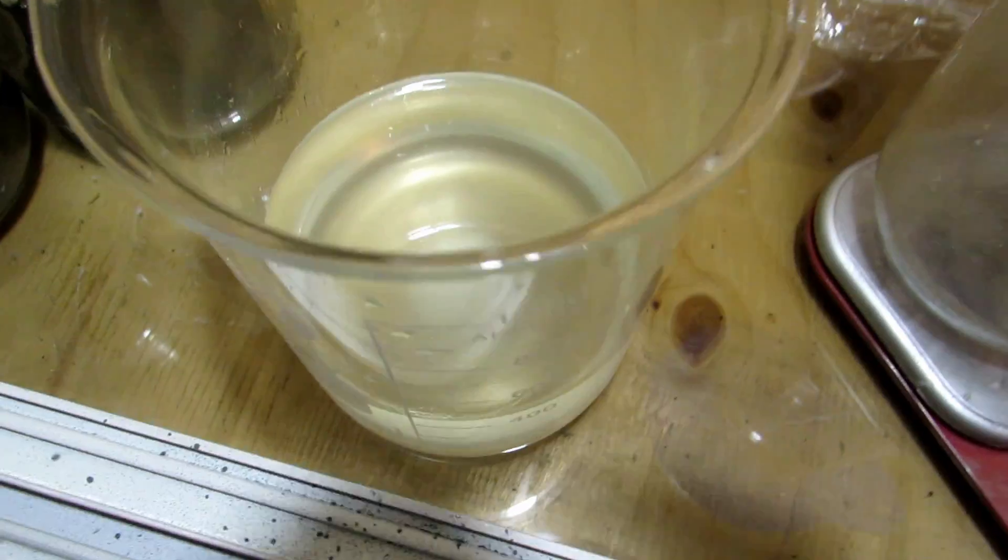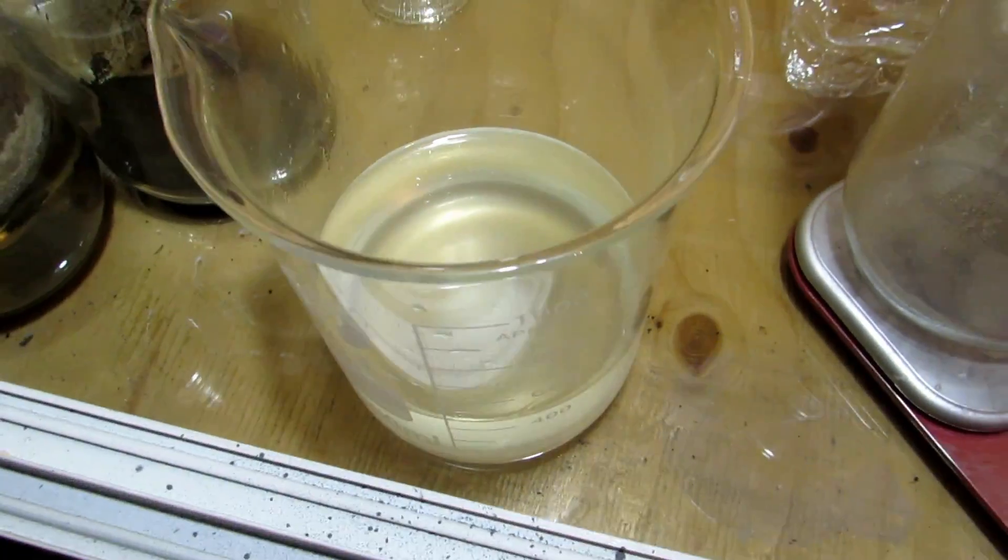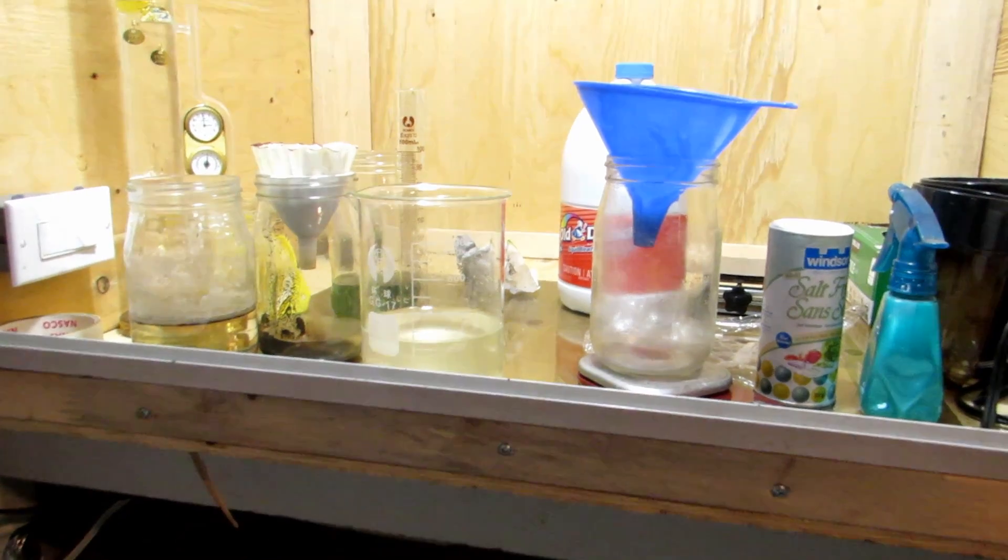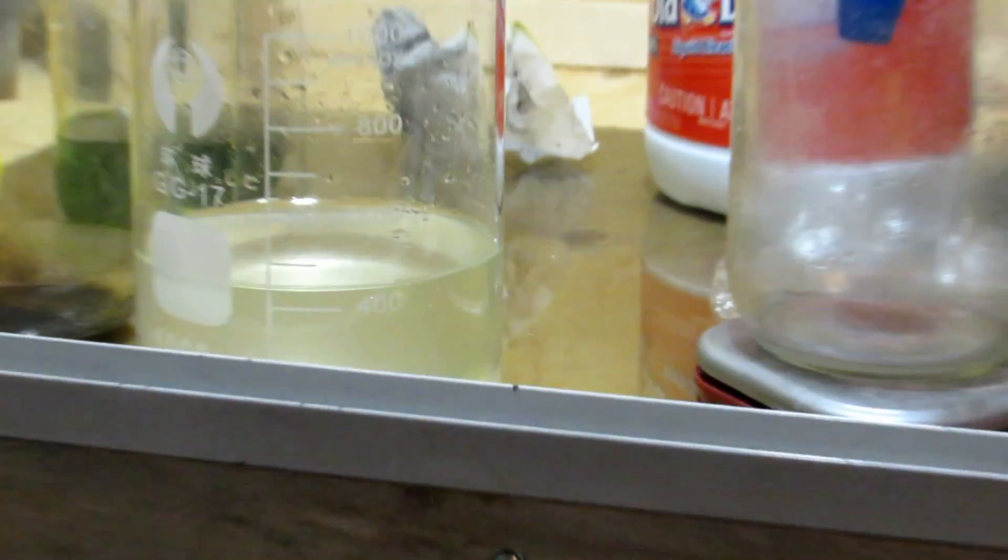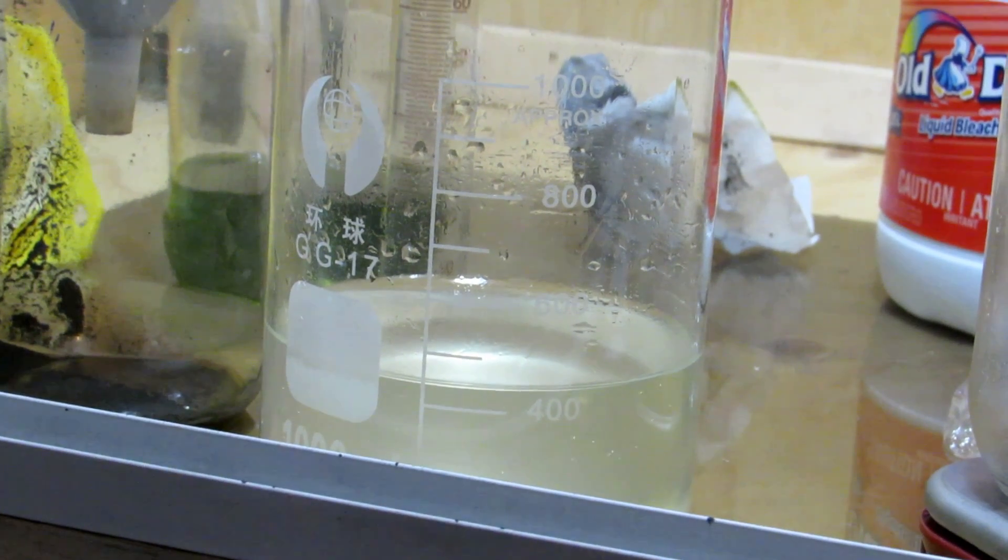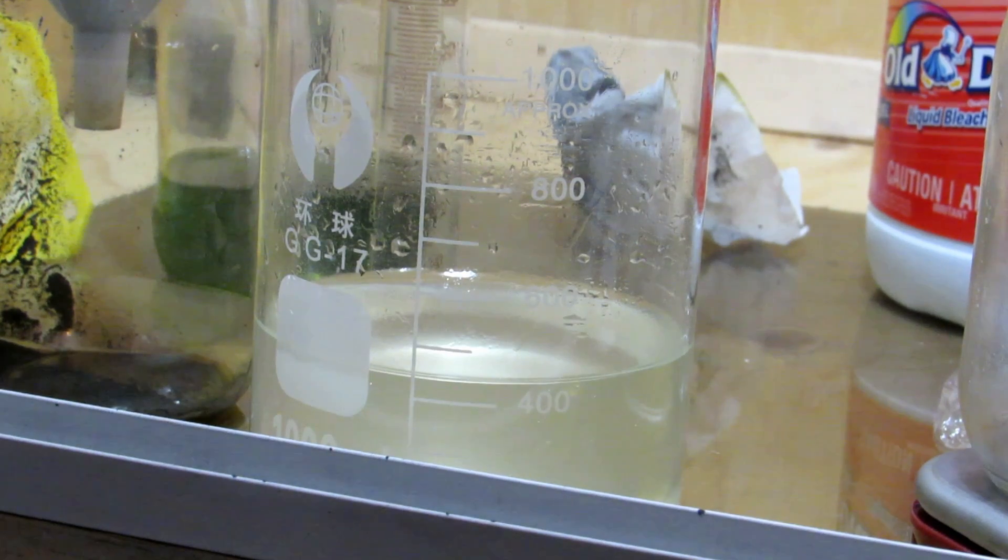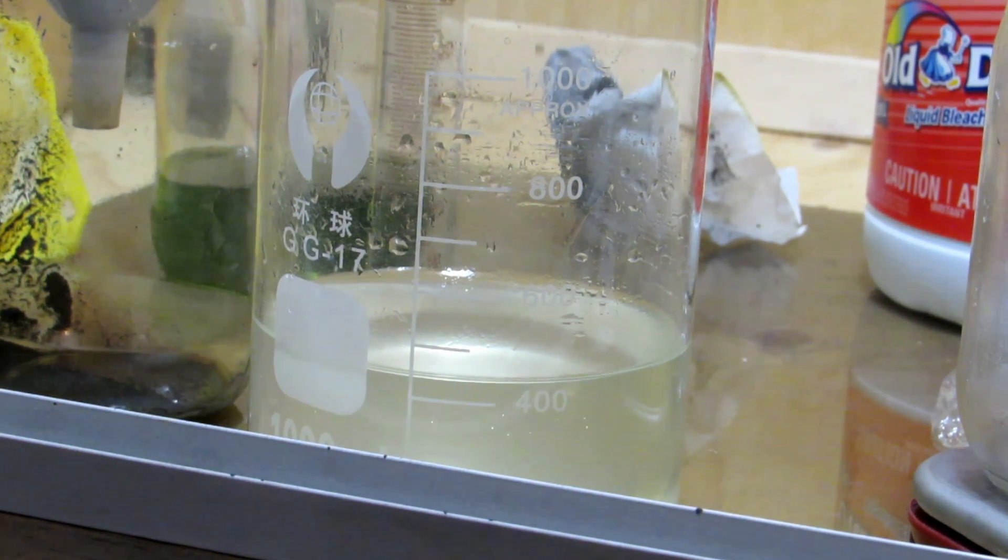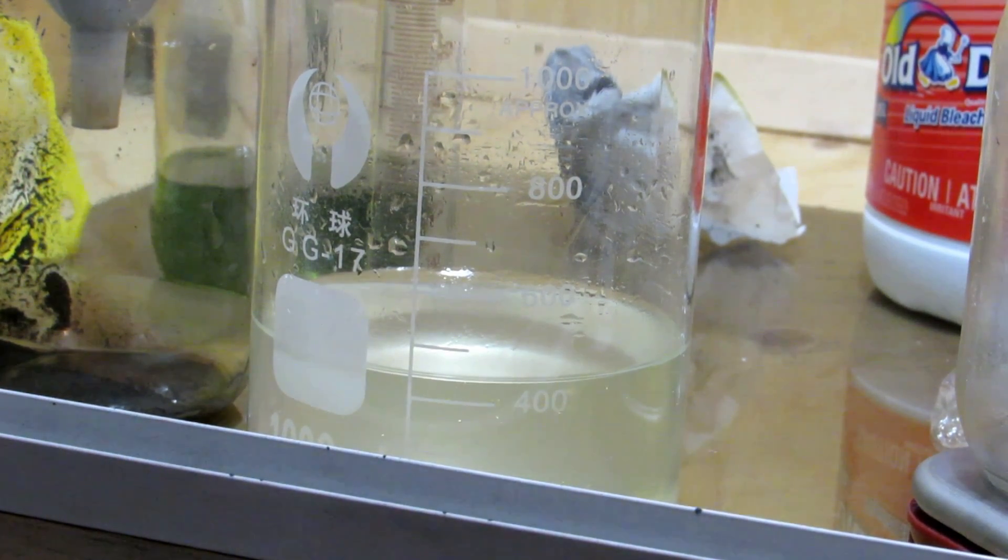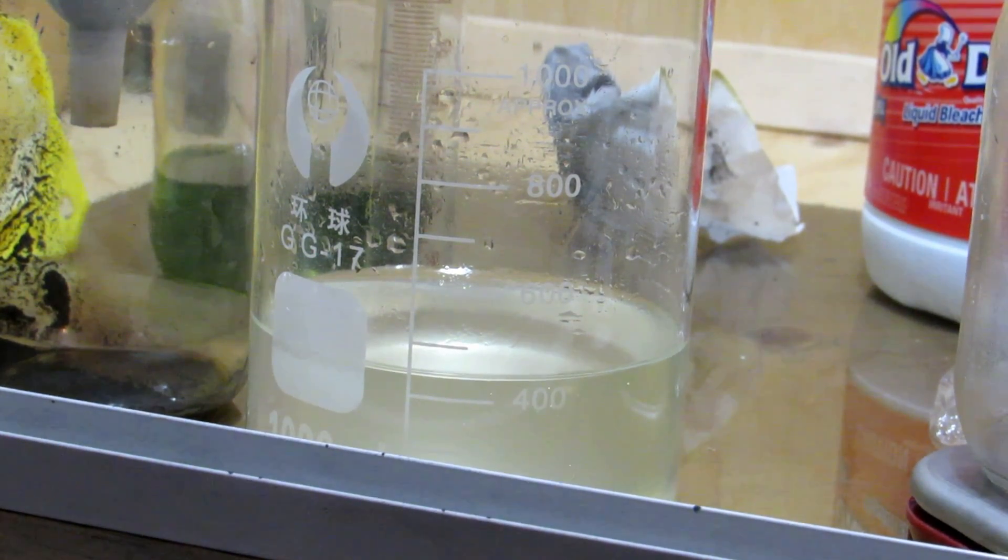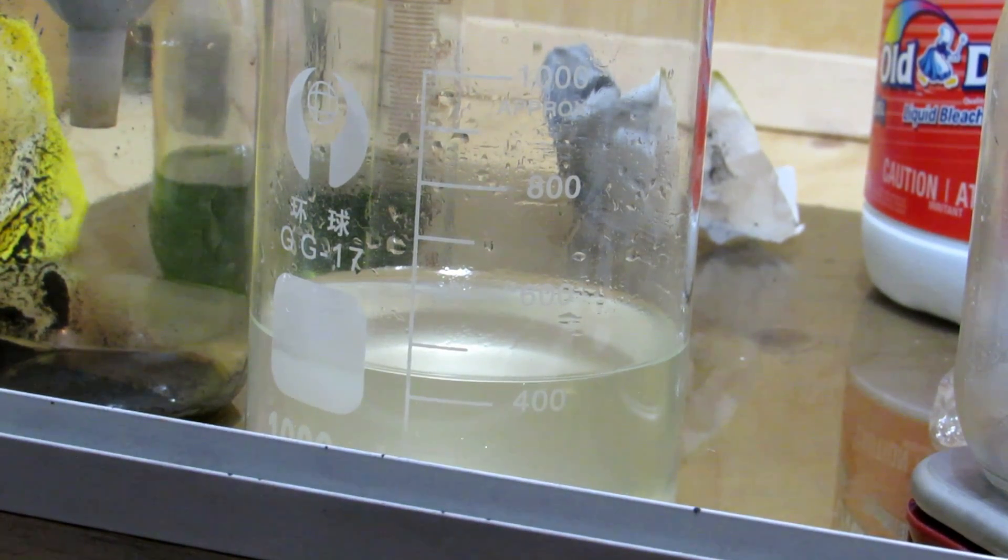Okay, so I added the two solutions, and as you can see there's a nice little pile of potassium chlorate crystals there. However, it's not done precipitating, still at room temperature. To get the rest of those crystals to precipitate, we're going to have to stick it in the fridge or freezer and cool it down quite a bit. The nice plate-like crystals are the exact crystalline structure that potassium chlorate forms, so we are quite sure that we have nice pure potassium chlorate here. So I'm going to stick this in the freezer to cool it down so we can hopefully get the rest of the precipitate out.